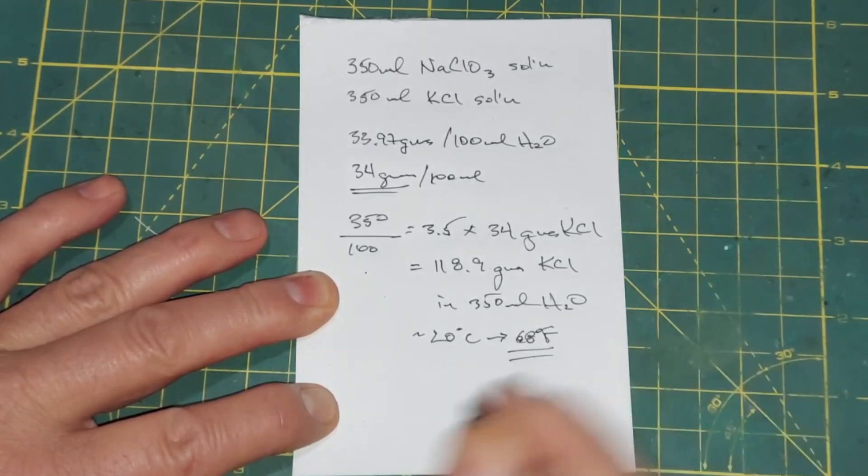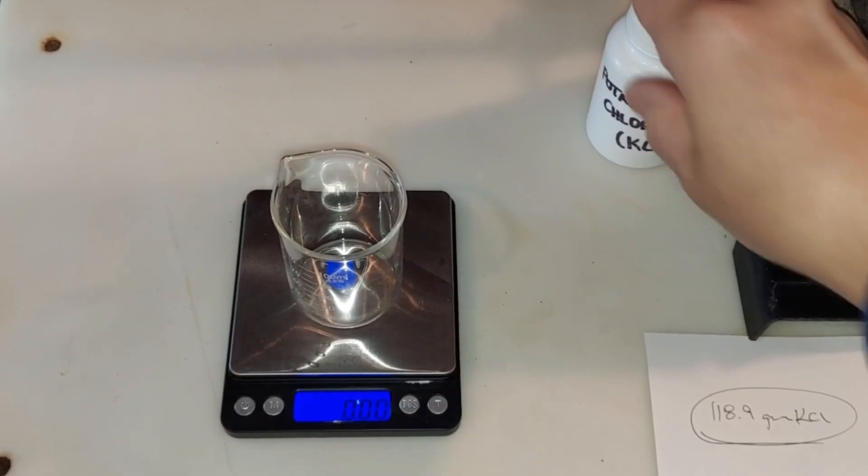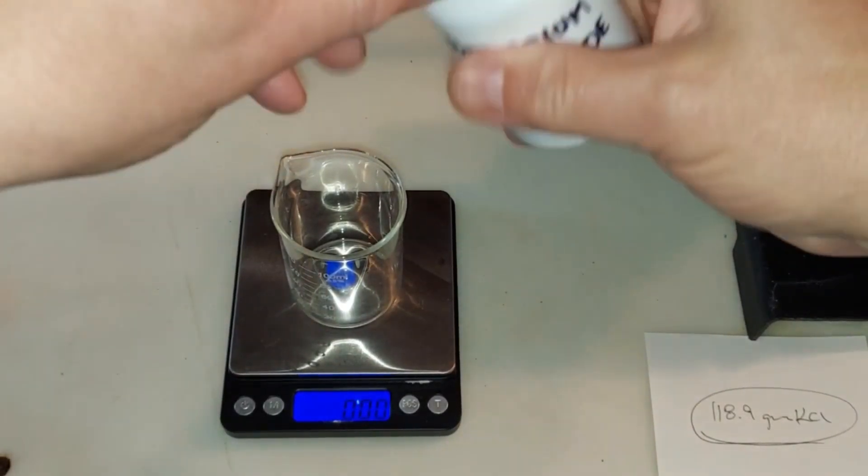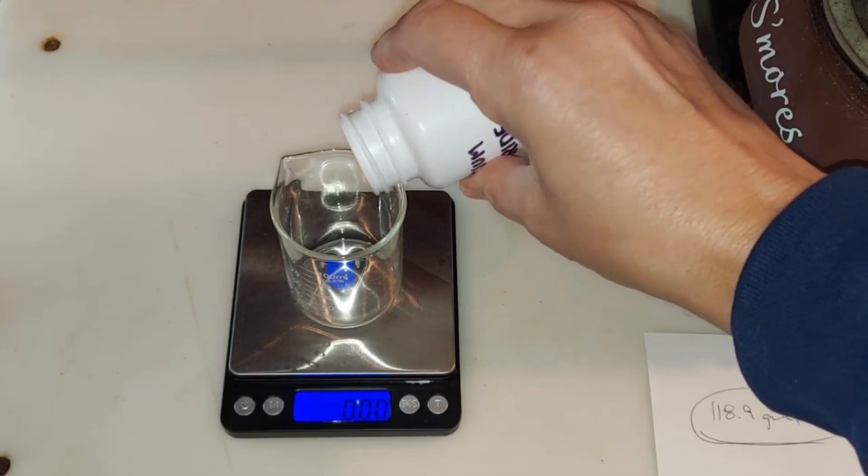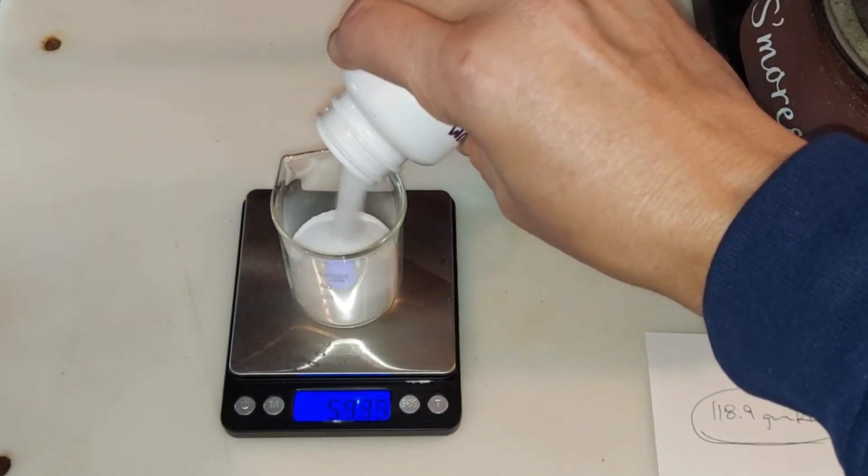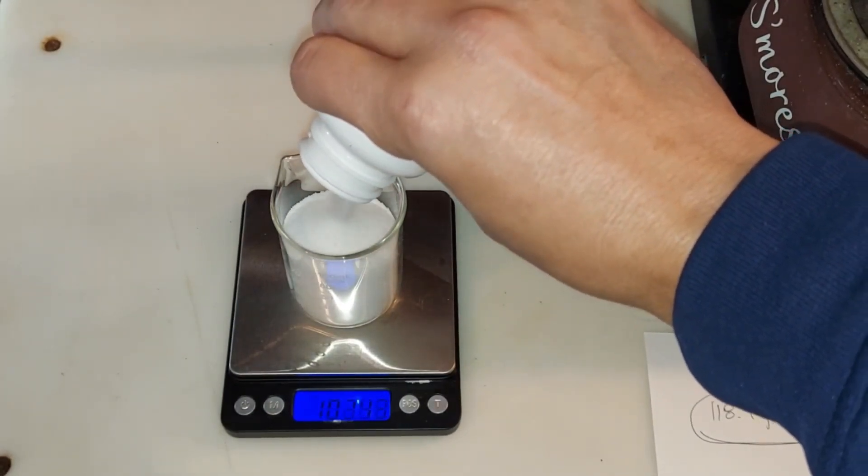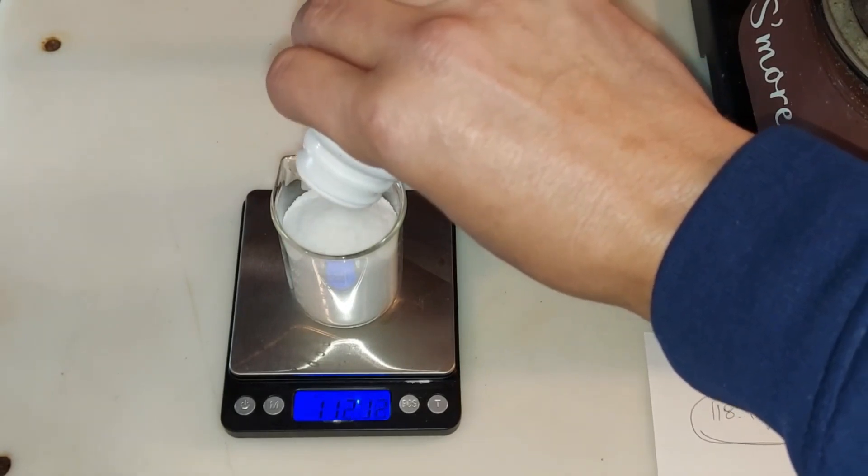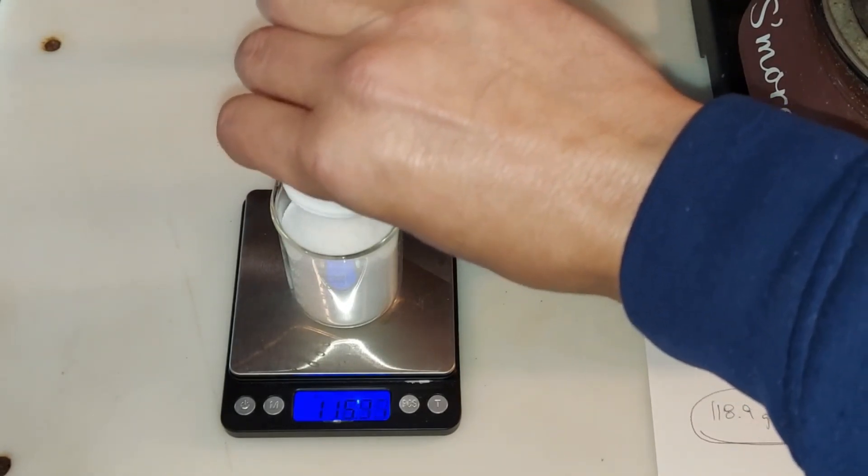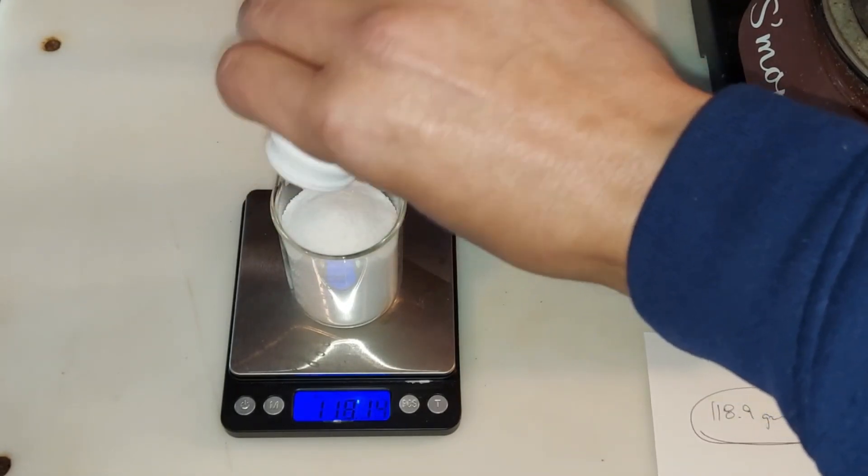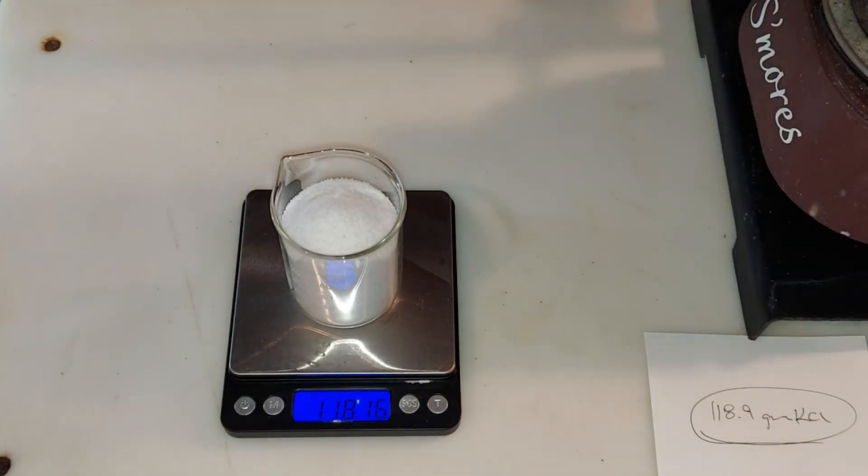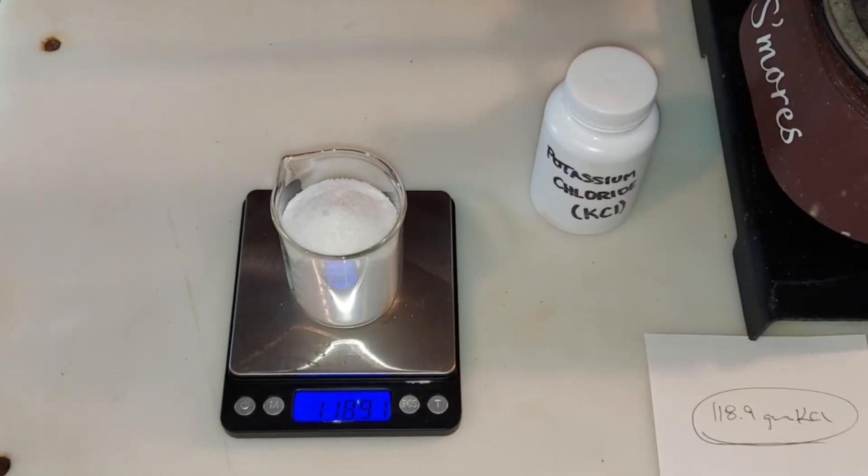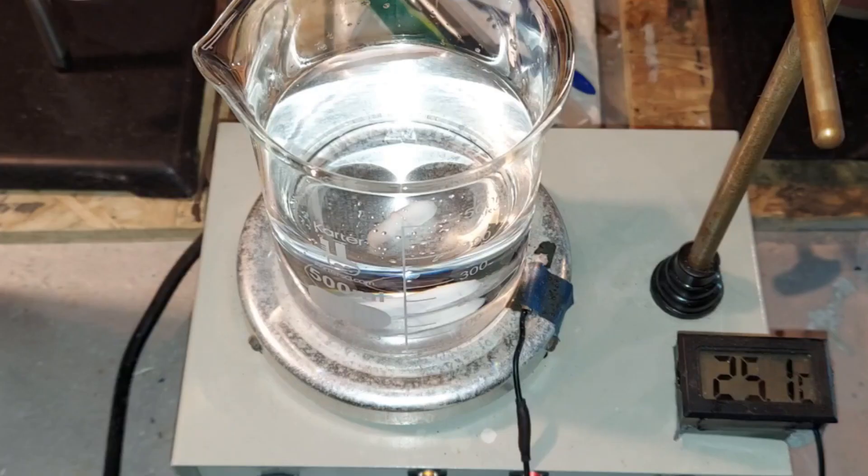We need 118.9 grams of potassium chloride. It emptied out. Oh my gosh, at 118.16 grams I added a touch more from another source, and we have 118.91 grams, and I'm gonna call quits right there.